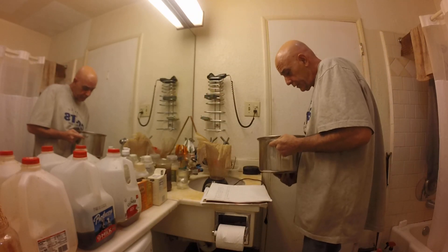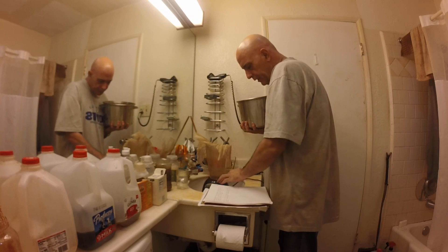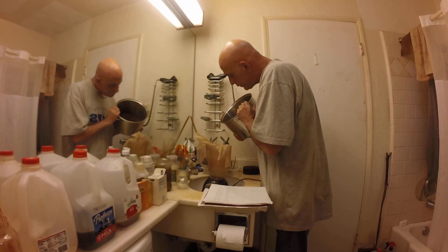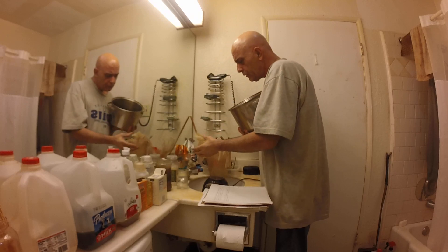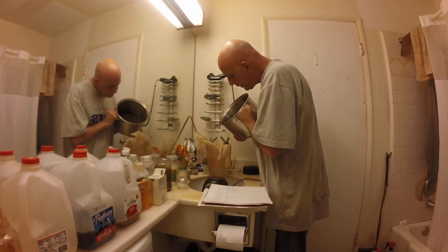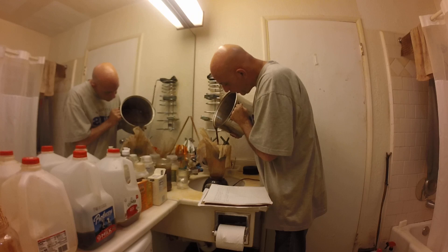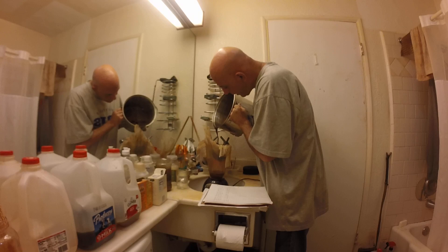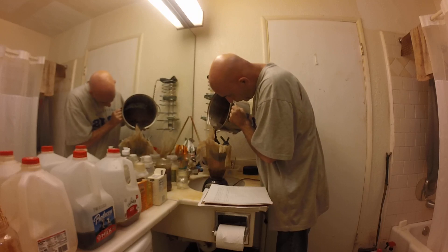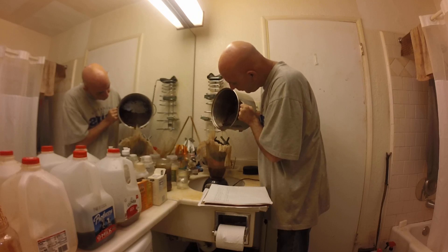Let's dump that and see what happens. I have a wide-mouth receptacle and it's pretty stable there in the bottom of my sink. Plus I have a little spill containment because I have spilled bad before. There's going to be a lot of seed come out, that's why I'm using this - it's 100 mesh silk screen that I bought at the local head shop a decade ago. We'll go slow but not so slow that it runs back down the back side of the lip of the pot. At some point the seeds sort of find their equilibrium and then you're pouring off pretty much just straight liquid.